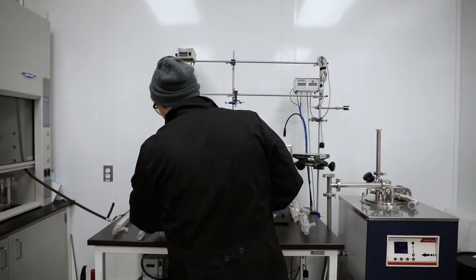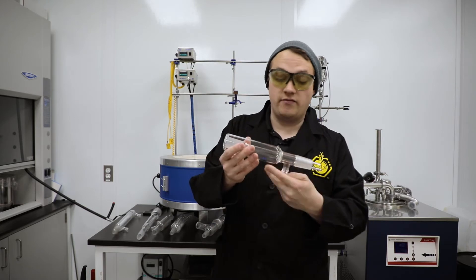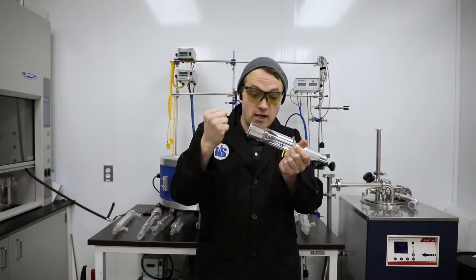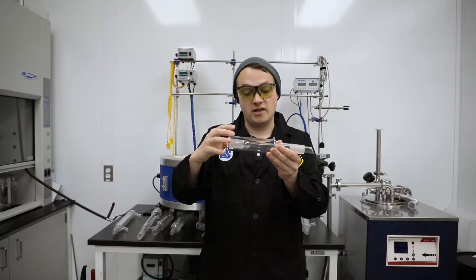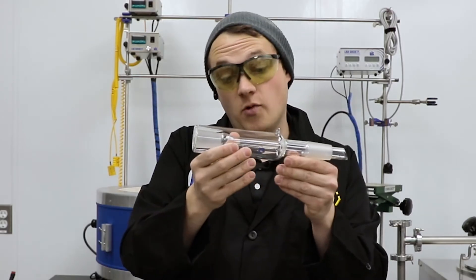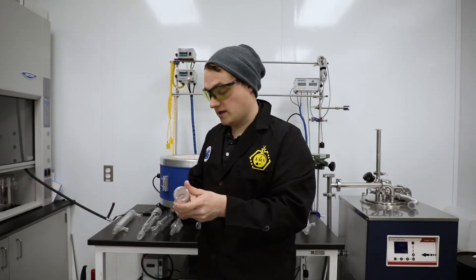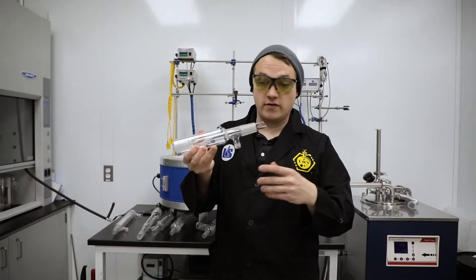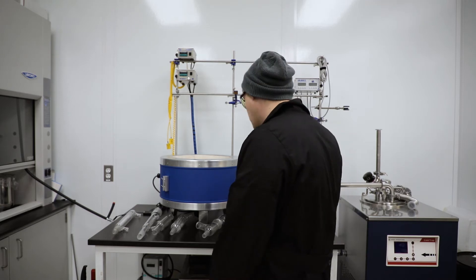Another type of Liebig condenser I'll go over is our vacuum jacketed Liebig. What's cool about these is that instead of being cooled or heated by a liquid in the jacket, it's just retaining heat — letting out IR heat but retaining heat. This is pretty useful in basically the step below hot condenser tech, where you're utilizing the heat from the distillation to actually cause some reboiling. These work really well for not using a liquid jacket. They're great for first passes. They push the condensation point farther down the tube, and we have an array of different types of these, including one with a vacuum takeoff and a Dewar style.